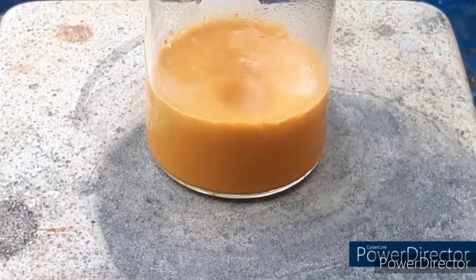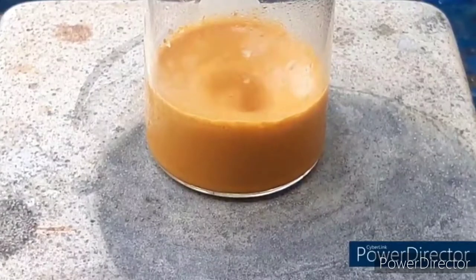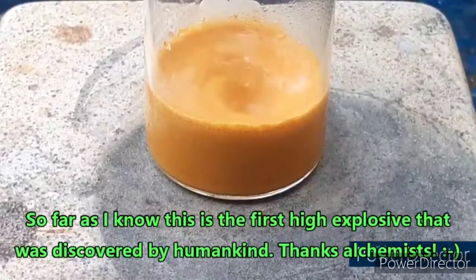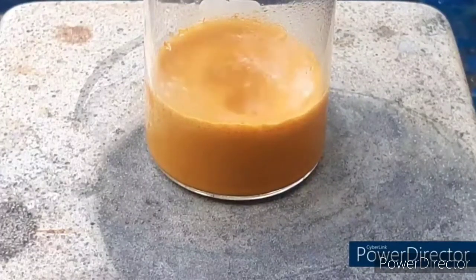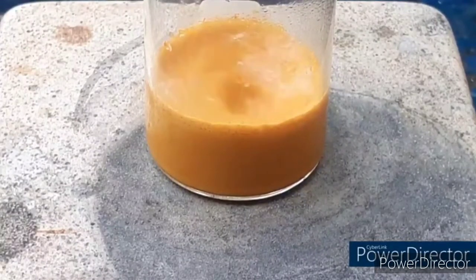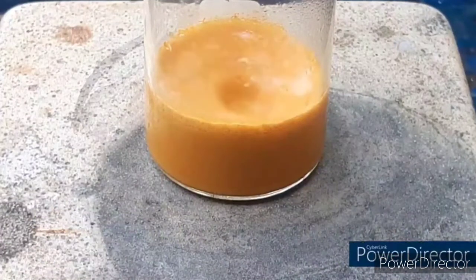It is only when it becomes dry that it's a problem. When it's dry, it is an extremely sensitive explosive. If you decide to make this stuff and dry it out, all the literature says it's extremely sensitive to shock and friction. But all the times I've tested it, and in videos I've seen, it kind of varies in its sensitivity. So be aware of that.